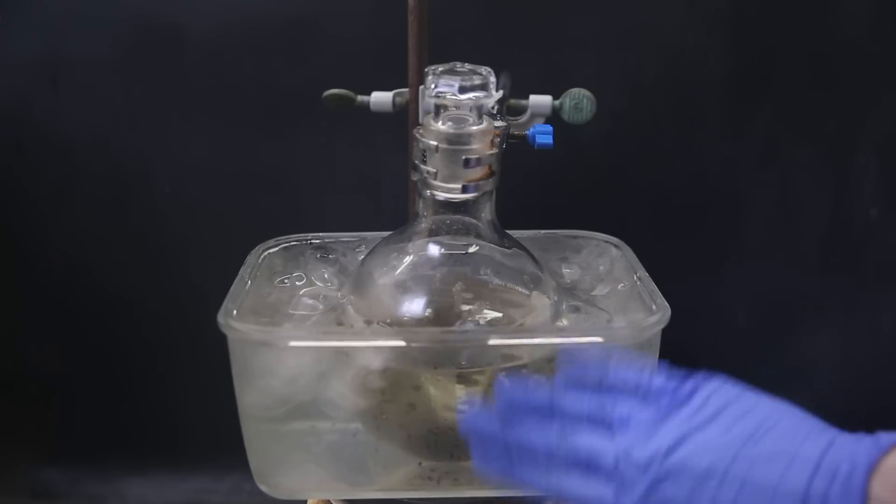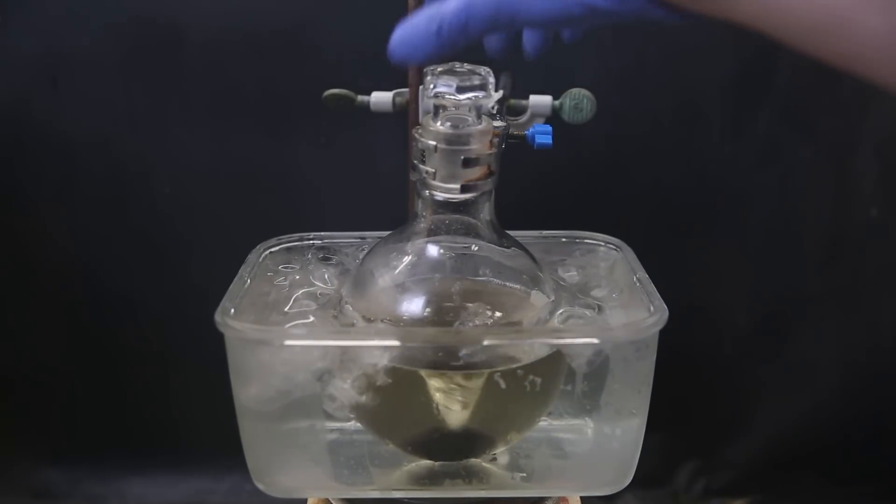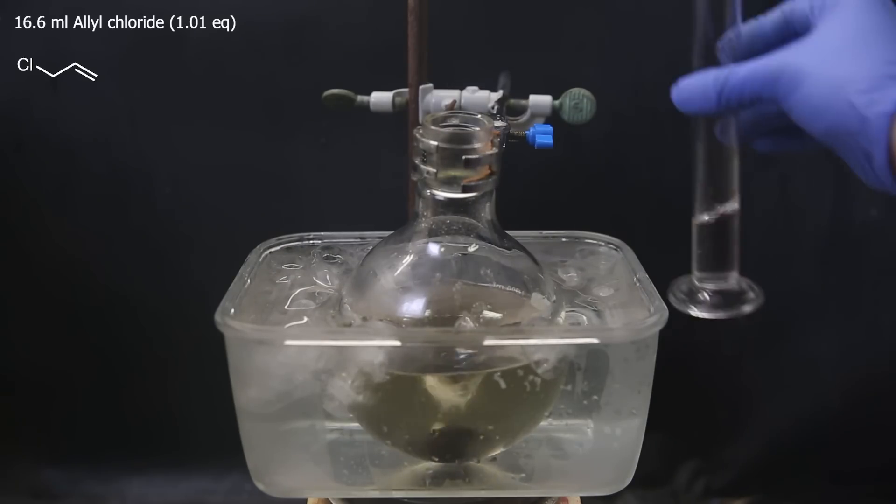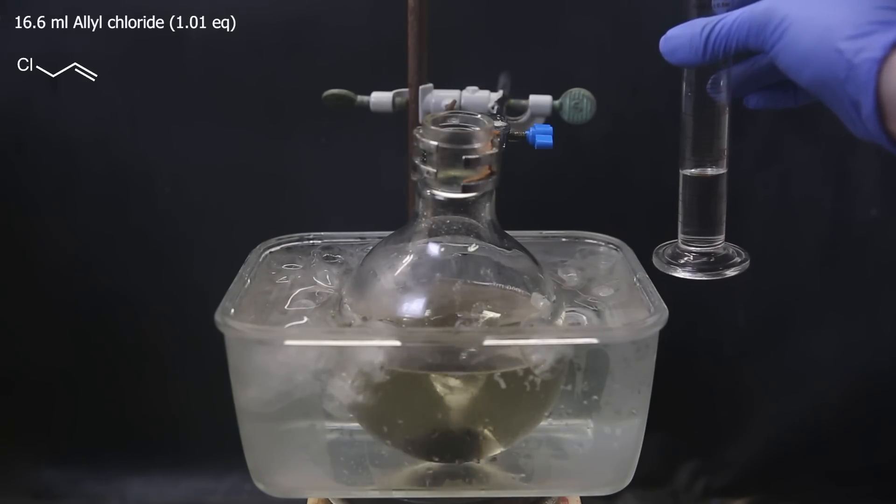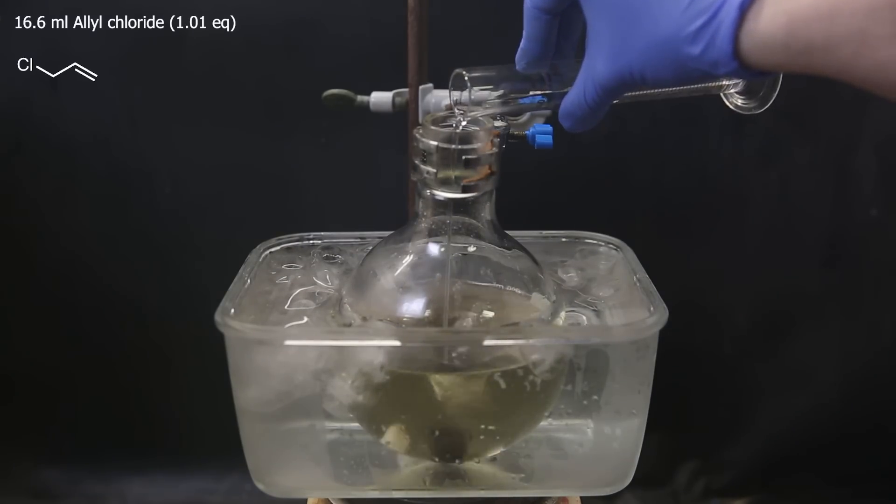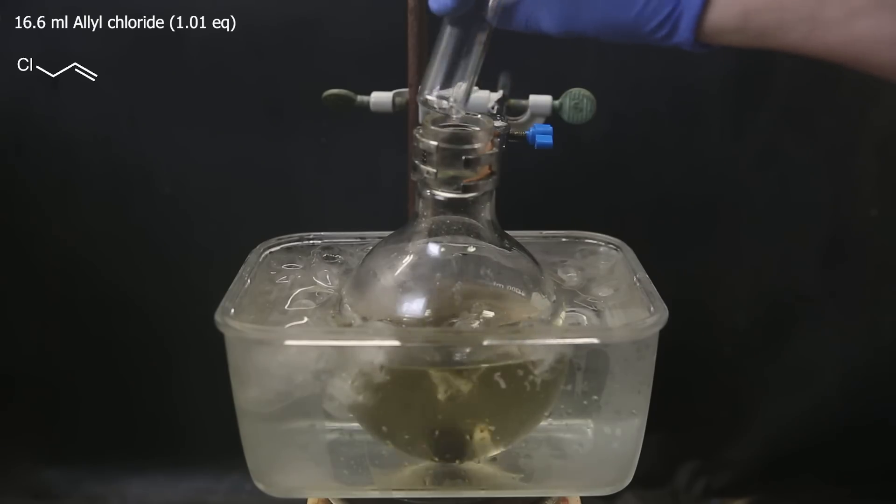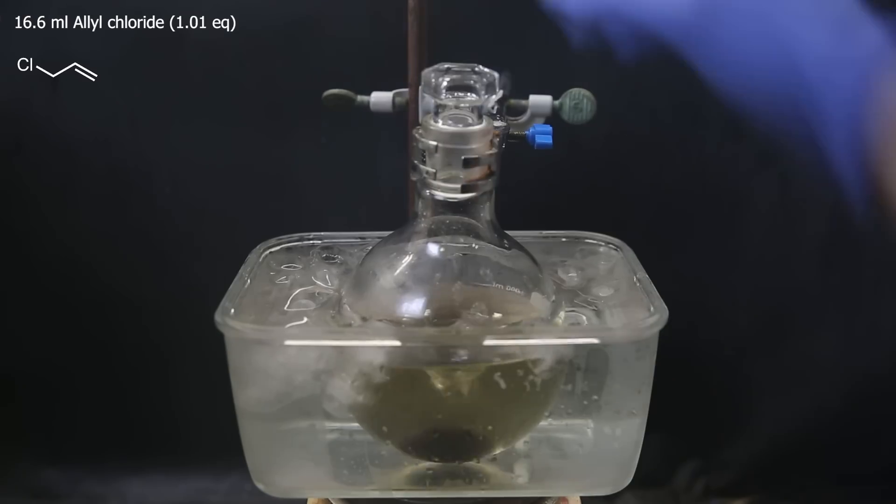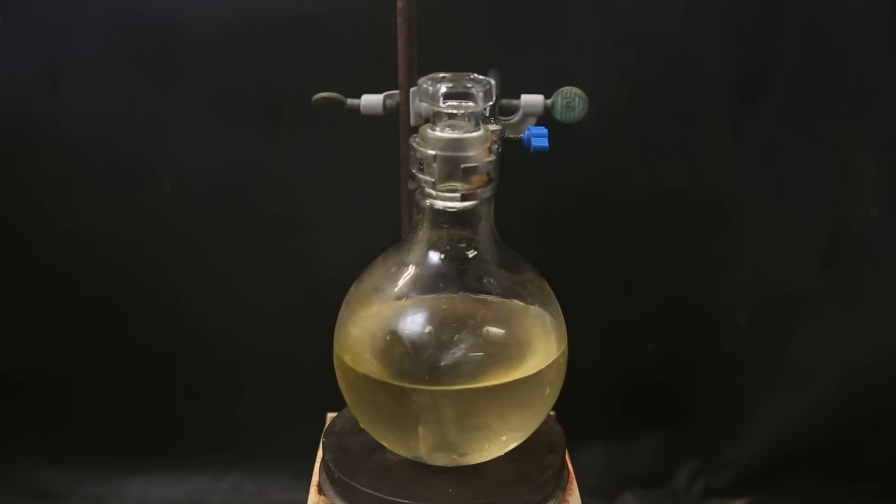When all of it has dissolved, we see it has become slightly yellow, probably from the formed intermediate, and at this point, I can add the next reactant, which is 16.6 ml of allyl chloride, and that can all be added at once, since the reaction isn't that fast. I then take it out of the ice bath and let it stir at room temperature overnight.